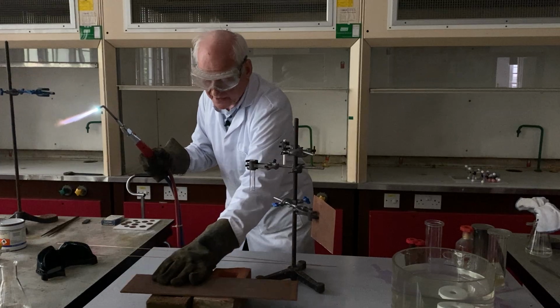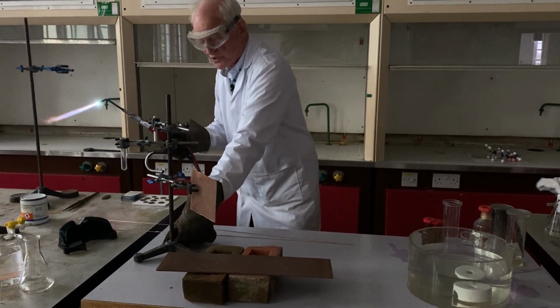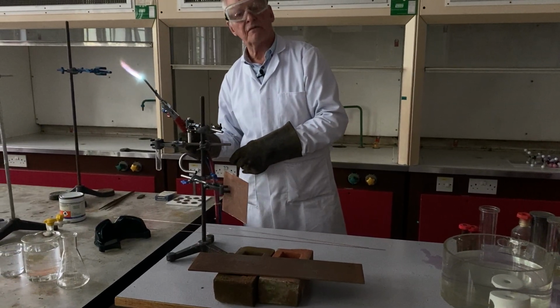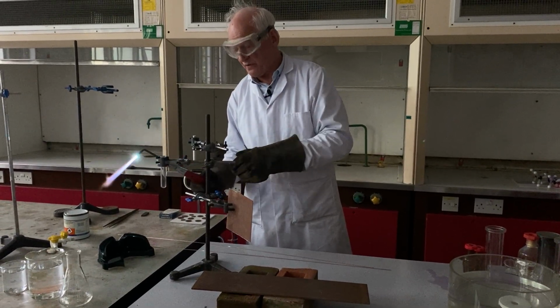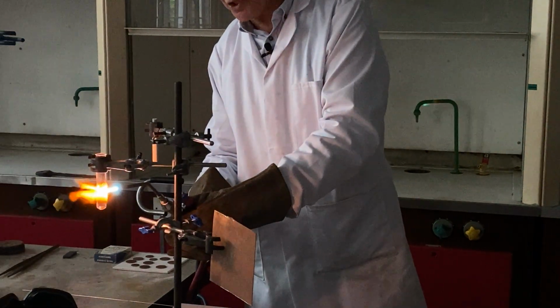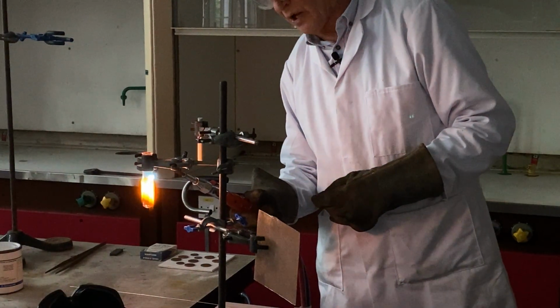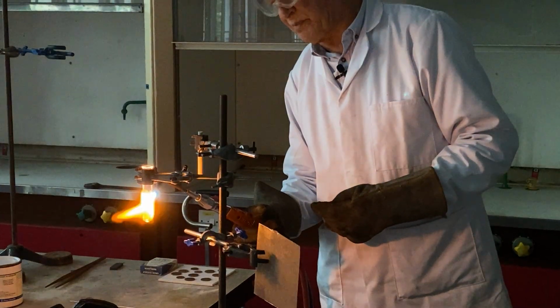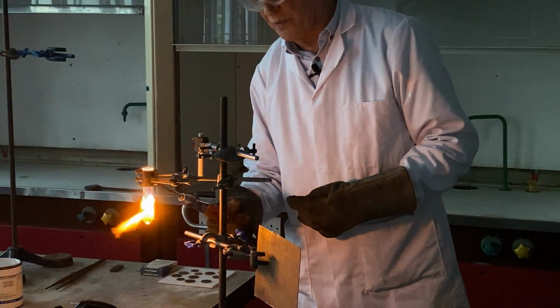What I've got here is a glass which is Pyrex glass. It's resistant to high temperatures, and nevertheless, the temperature we have here is just over 3,000 degrees centigrade. That will certainly be enough to melt glass. So if I now start heating this up, you'll notice that there's a bright orange color. Now that bright orange color is due to the sodium content. This glass is primarily sodium carbonates used in the manufacture, and there's silicates as well. So that's the bright orange color.